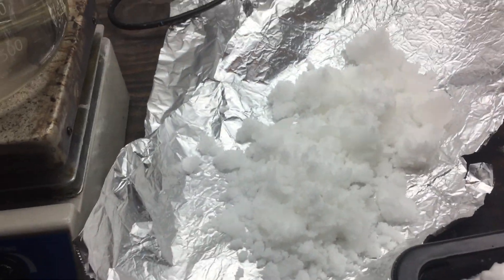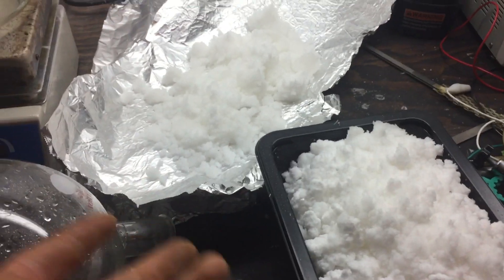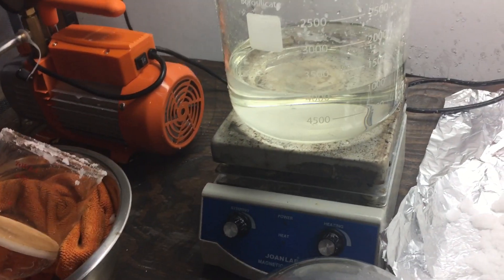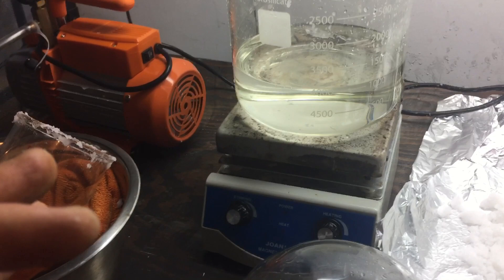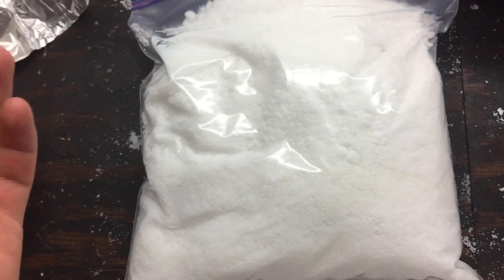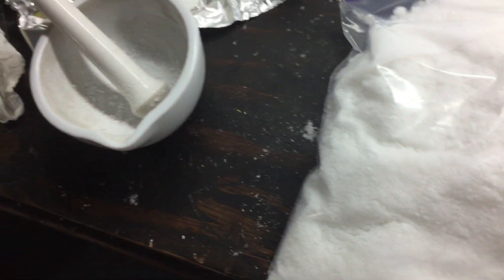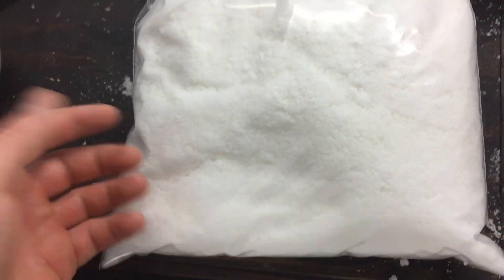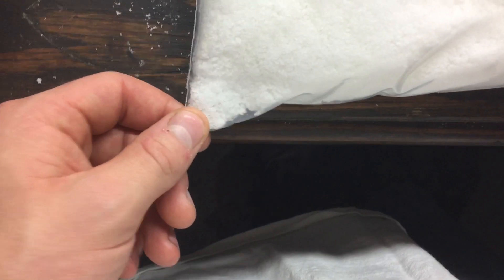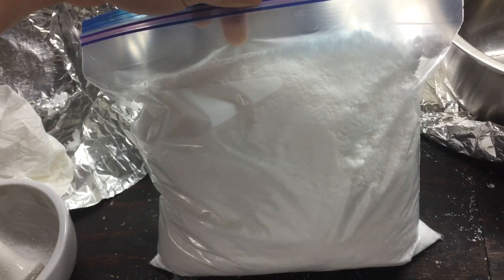With another good amount of salt removed, I will begin to boil the solution down again, and once I finish crystallizing everything I'll show you the final product dried and crushed into a fine powder. After a lot of work, the final result came out to pretty close to five pounds again of ammonium nitrate. You can see there are still some clumps I didn't manage to pulverize — I was using a pestle and mortar, which took a long time. But this is definitely a lot more pure than the product I started with. And there you have it — five pounds of ammonium nitrate.